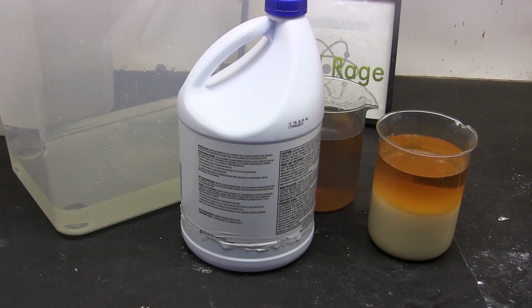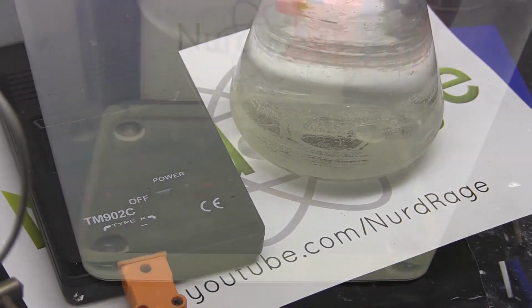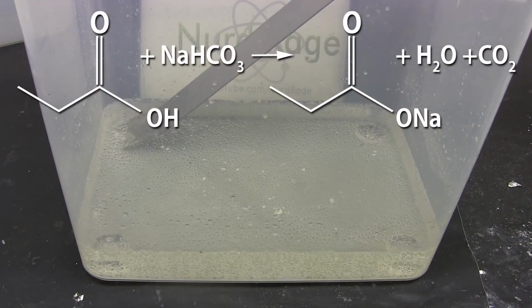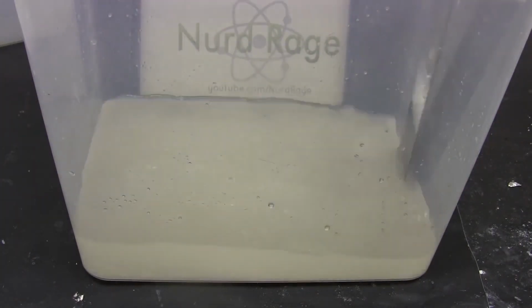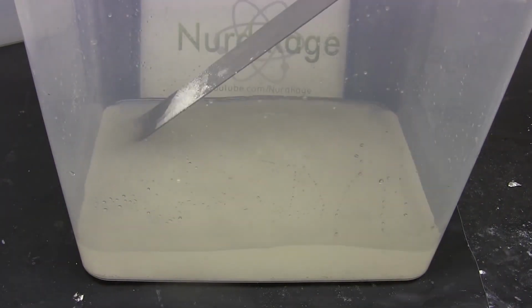Anyway, we now have to separate the water from the propionic acid. We can't just distill it since it forms an azeotrope, so we're going to go a roundabout way and add sodium bicarbonate to react with the propionic acid and convert it back into sodium propionate. Since we don't know exactly how much there is, we'll have to crudely titrate by adding small amounts of sodium bicarbonate and stopping it when it no longer fizzes. At this point, all the acids have reacted.